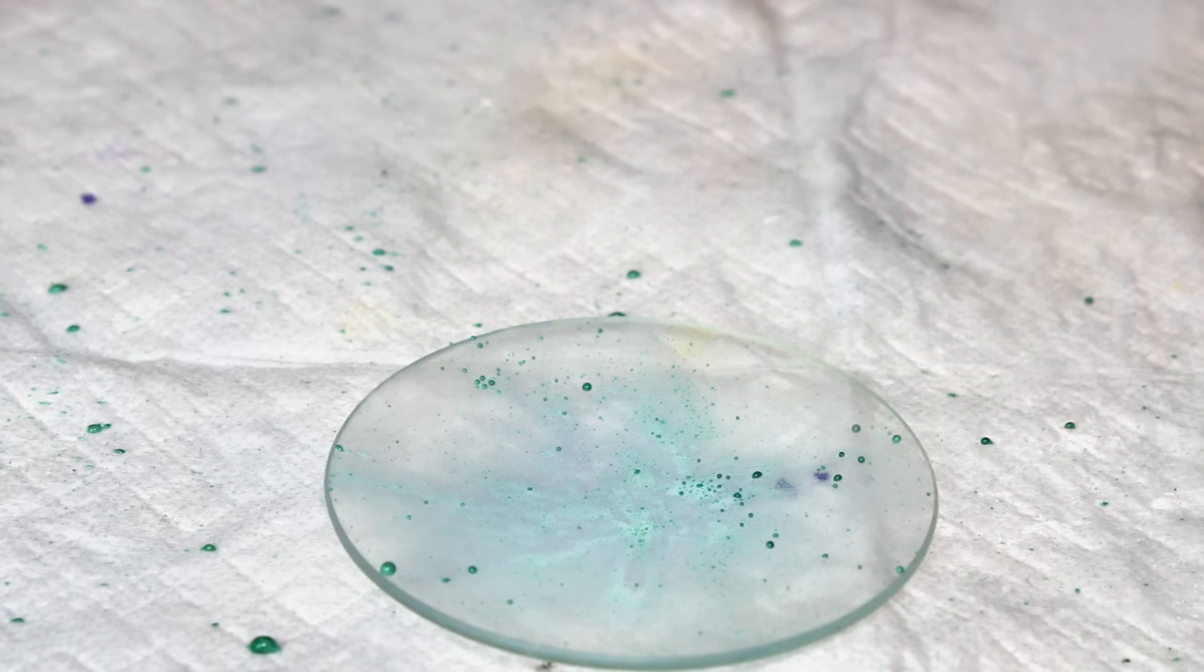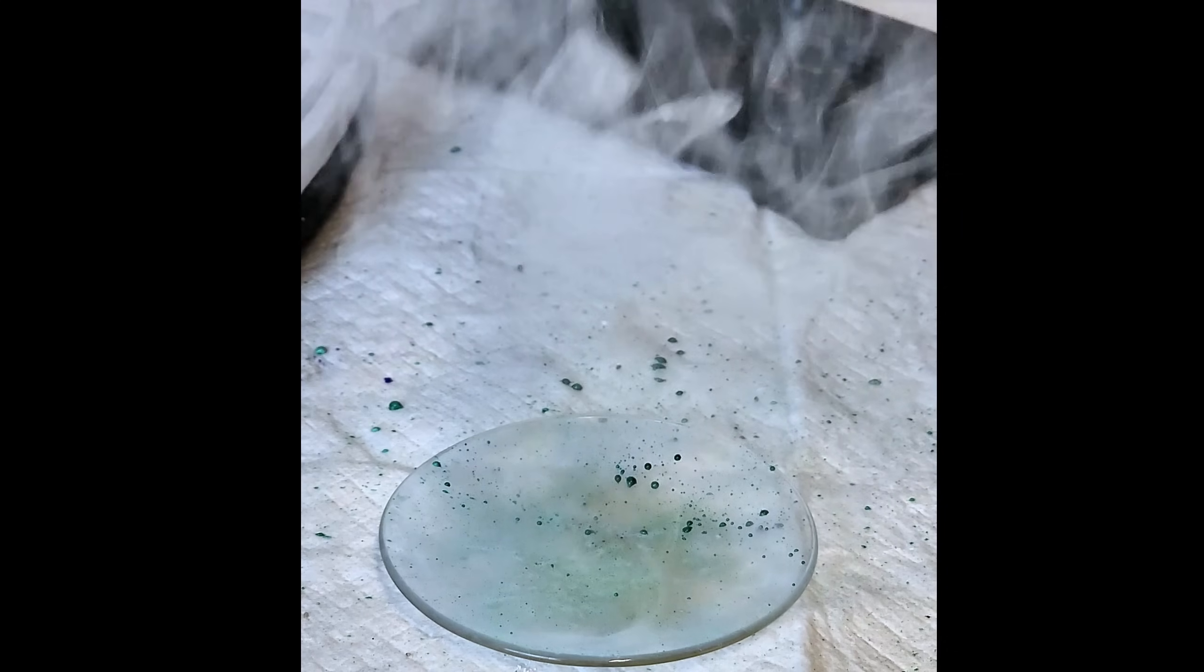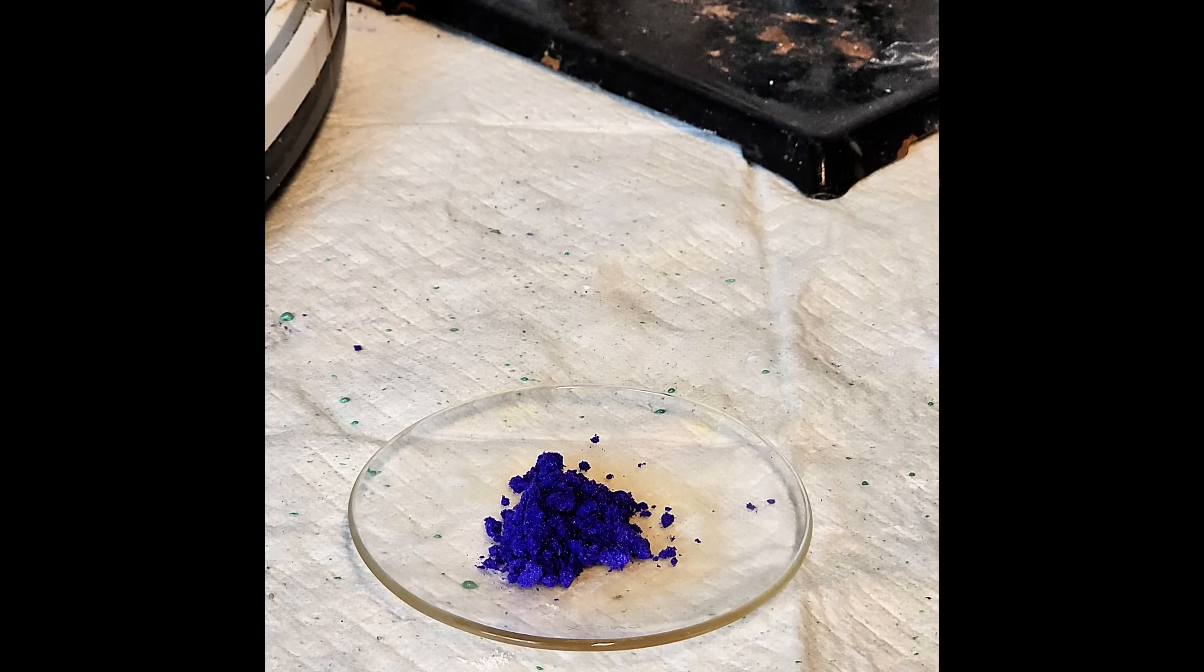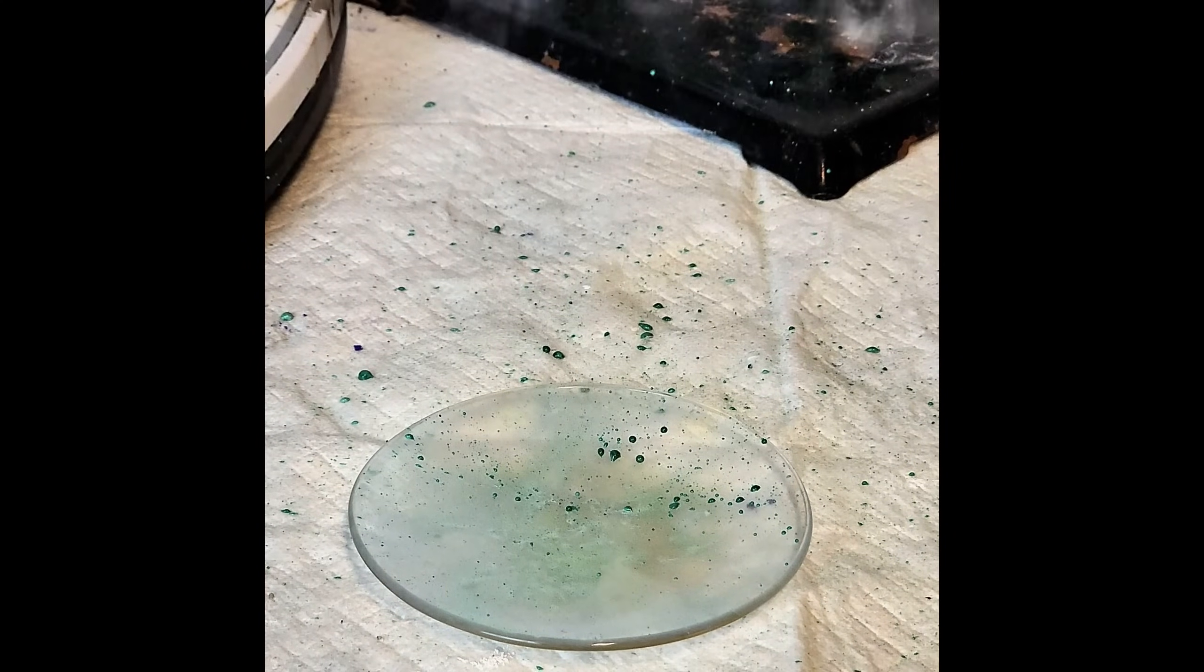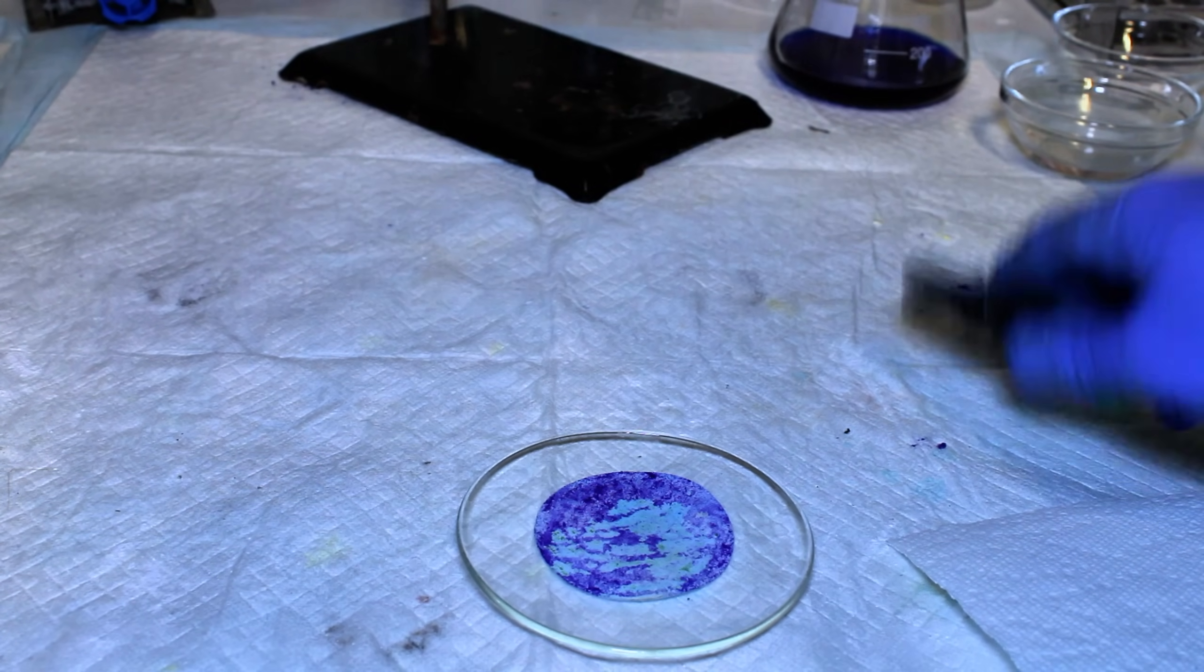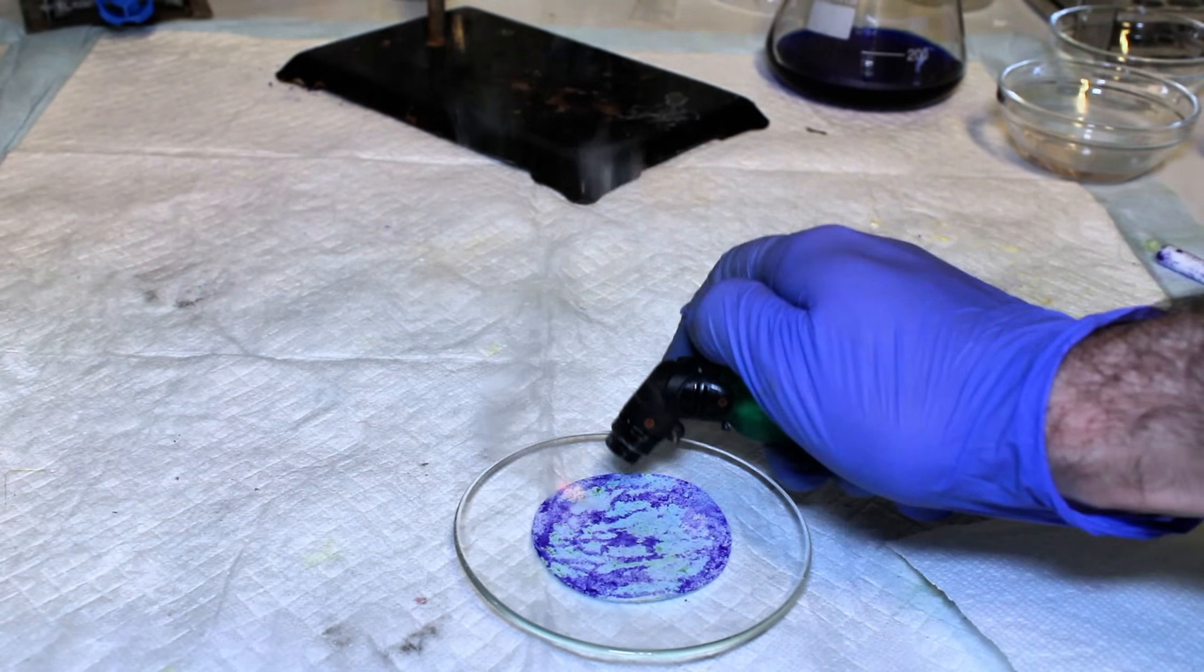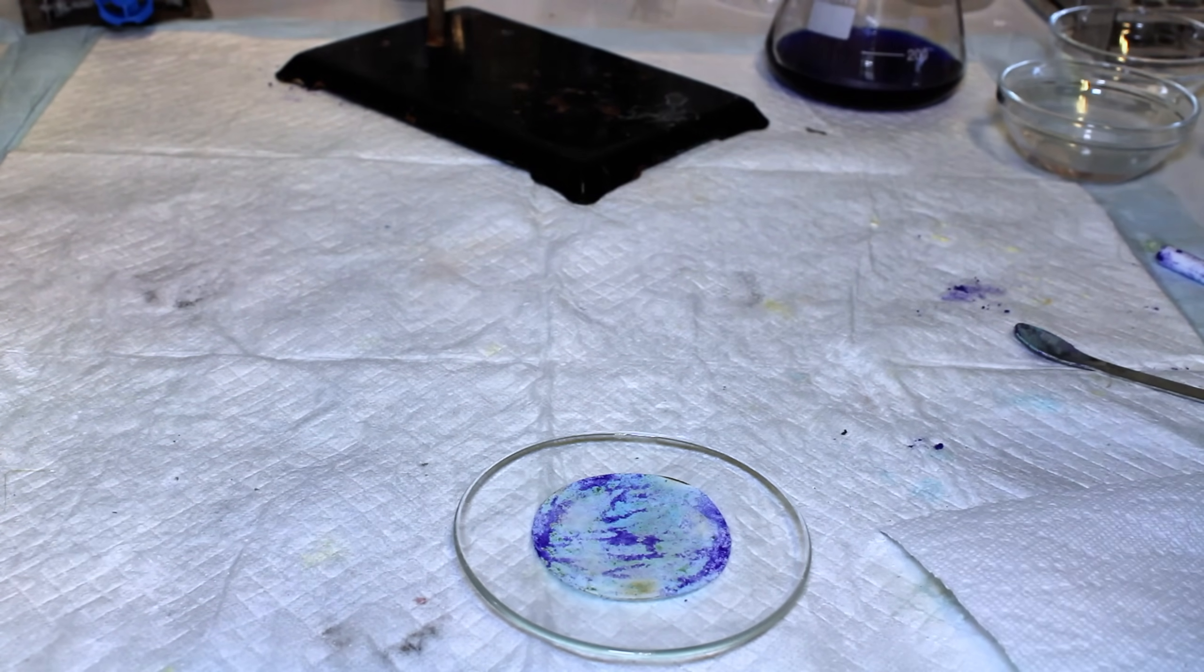I'm not actually sure what the reaction byproducts are here, but I'm assuming ammonia gas is definitely one. That along with sulfur and possibly nitrogen oxides, and their gas phase reaction to ammonium sulfate, sulfite, and nitrite could explain the vapor cloud produced. As for the green residue left behind, it's certainly copper based and looks very much like copper hydroxide or carbonate. However, I blasted this stuff with a propane torch for over a minute and didn't decompose it, so it really can't be those.